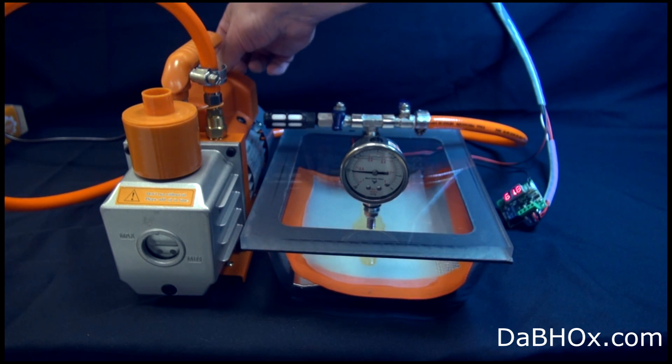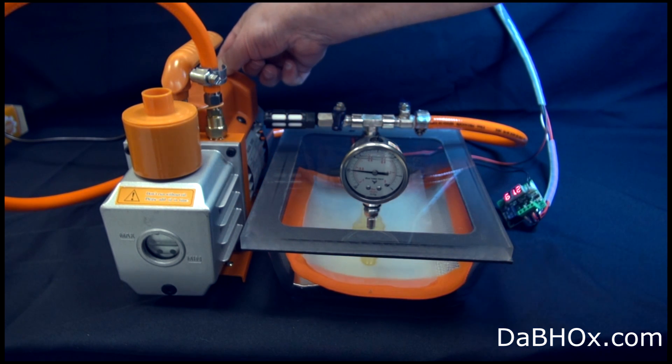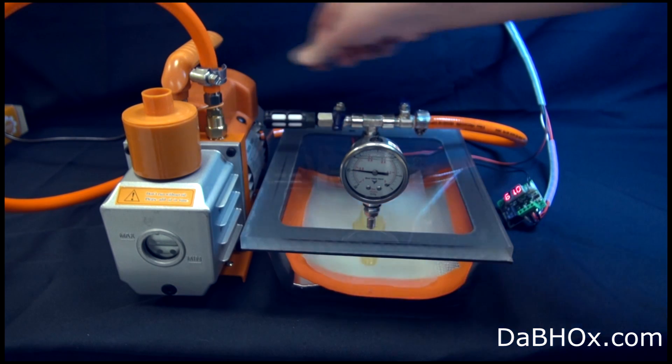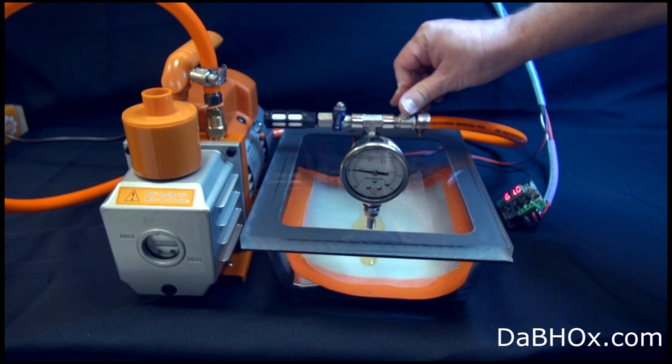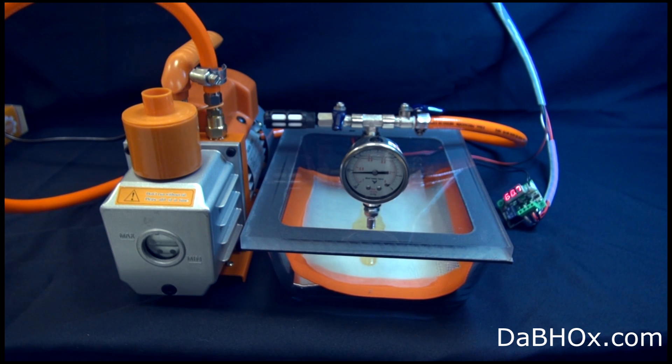And you can turn the pump on and off several times to pretty much achieve desired effect for your product. You can actually see there are bubbles building up. Some gas has been pumped from the system, from the product actually. And again as soon as you achieve desired product, desired condition of the product.